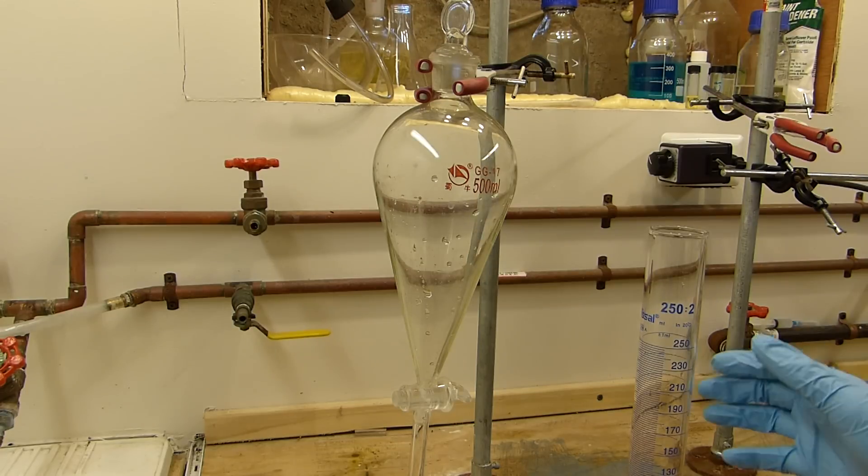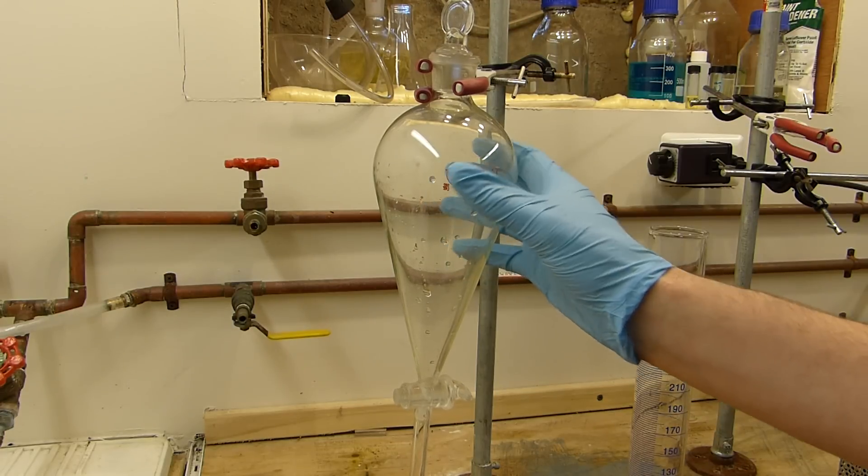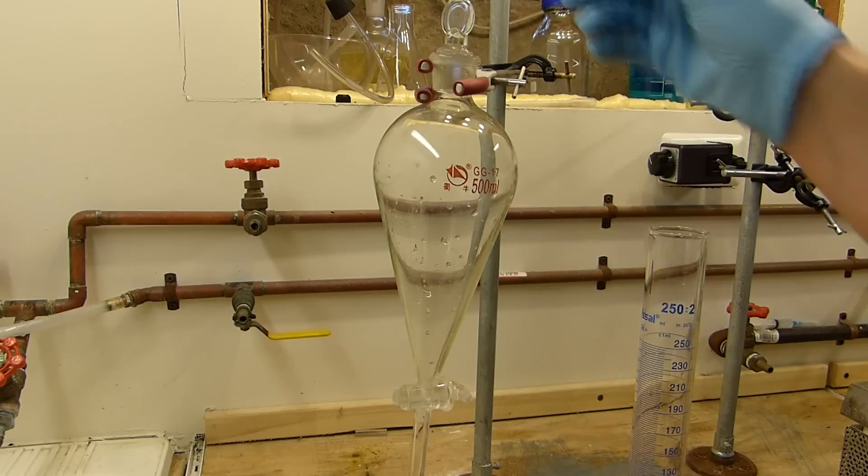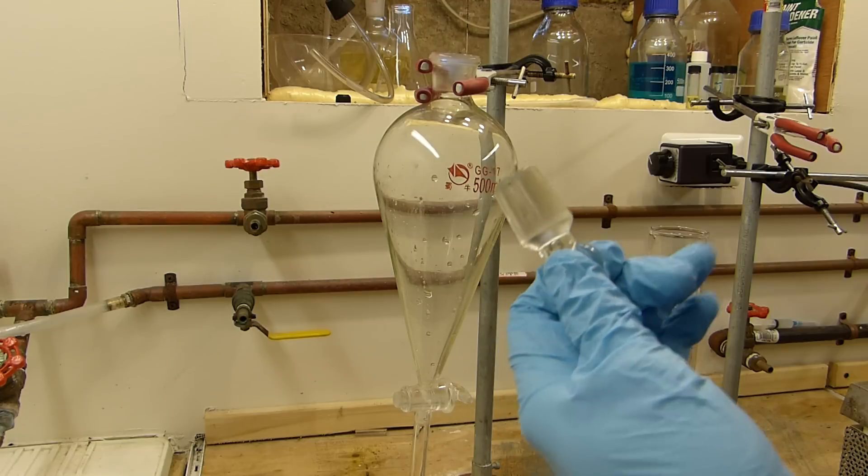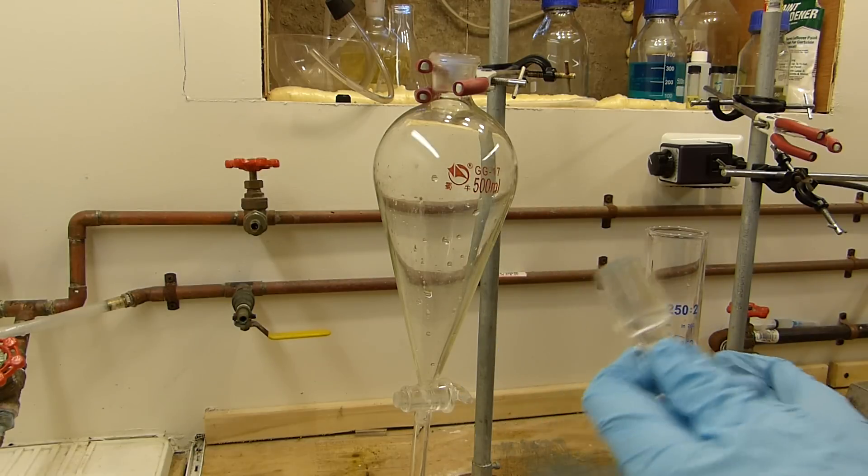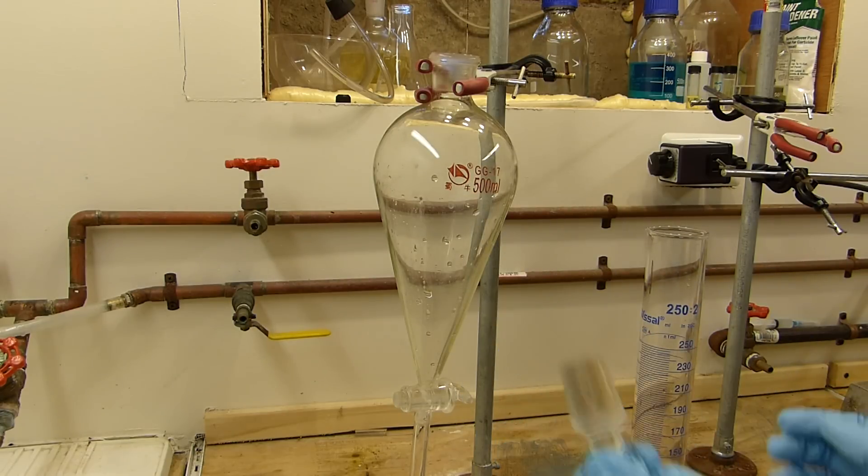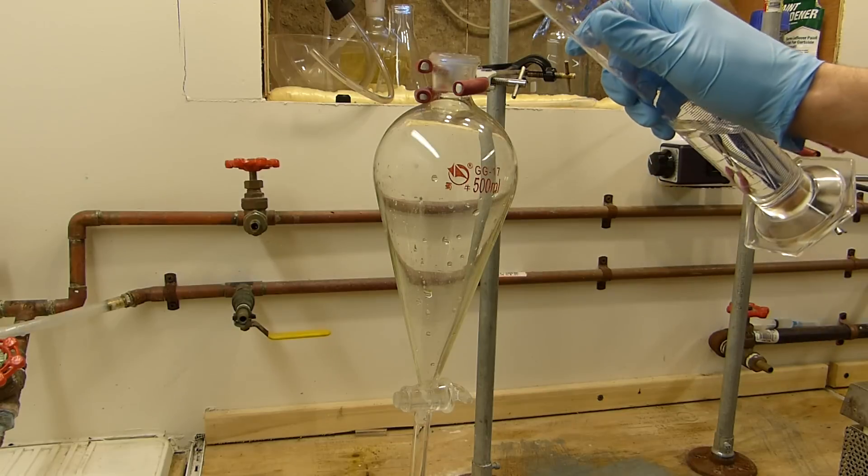We'll now transfer the hydrochloric acid to an addition funnel, making sure the stopcock is first closed. Of course, that's a common mistake to make. The stopcock joints are well greased because this is going to go in the freezer and I don't want the HCl to be escaping into the freezer where it could damage a bunch of things that are in there.